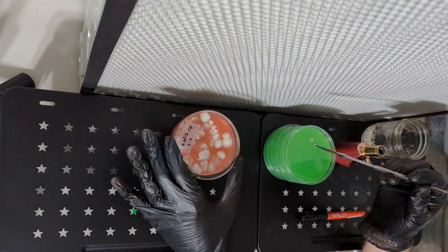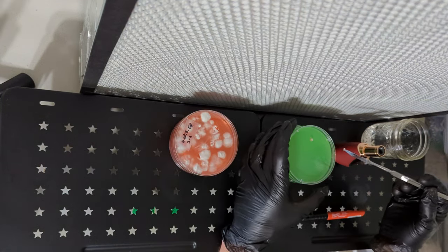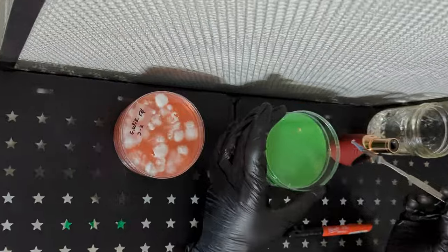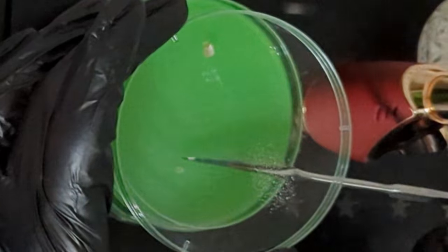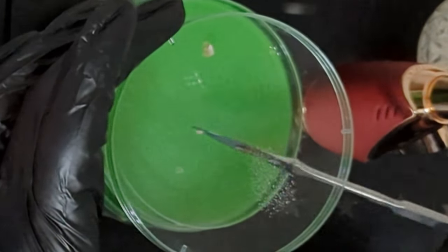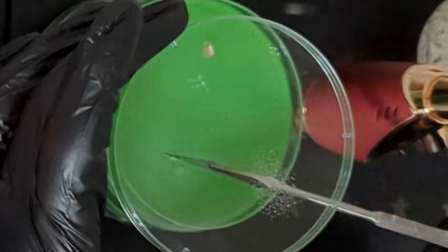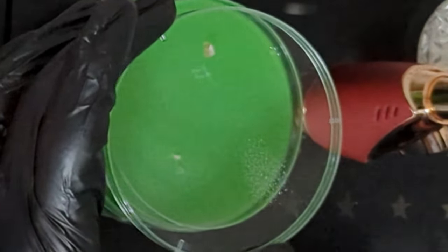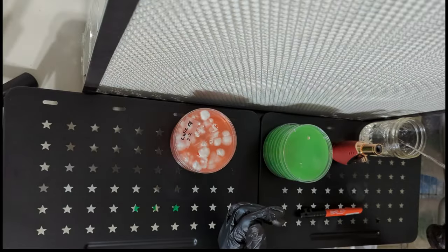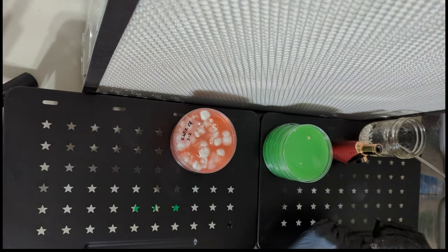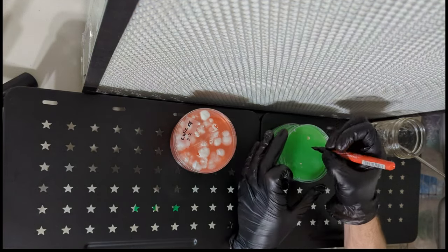With the T0 plate you basically have two options to proceed. You can spawn the T0 plate to grain and run all the cultures on the plate. This is typically what's called pheno hunting. If you are trying to find a different looking mushroom, for example an albino mushroom, a leukistic mushroom, a squat or short thick mushroom, or any variation besides the normal expression, this is how you would do it.